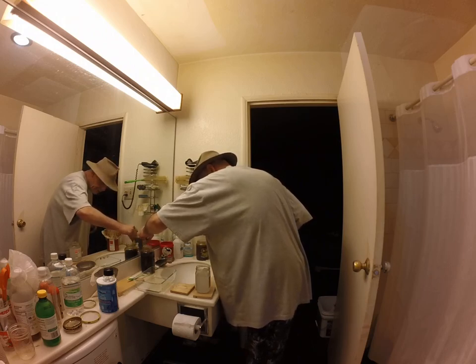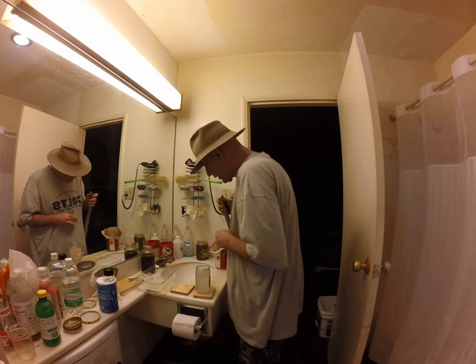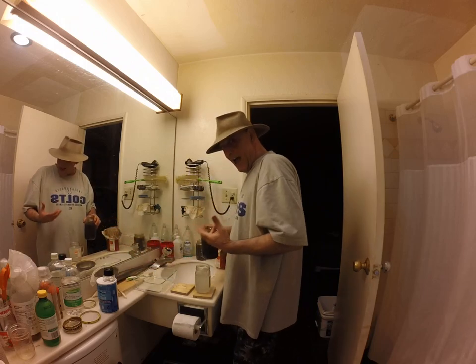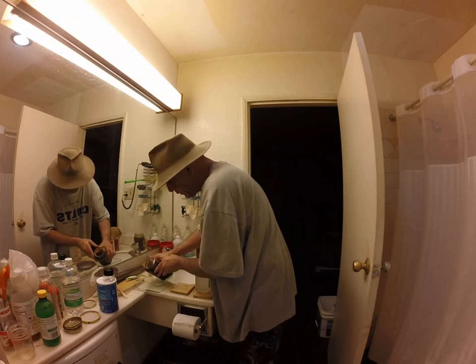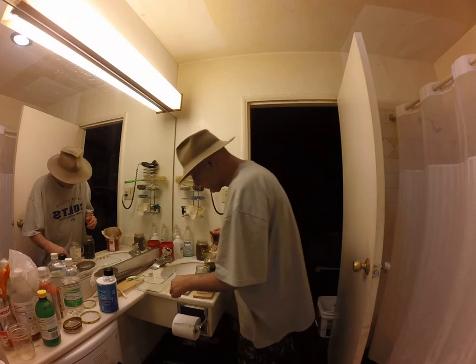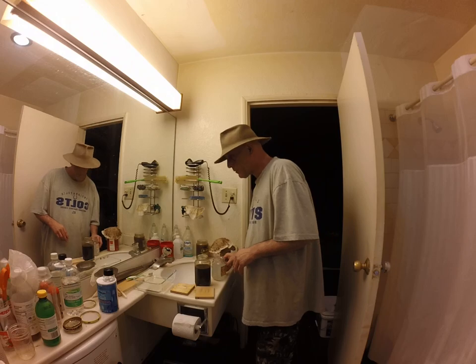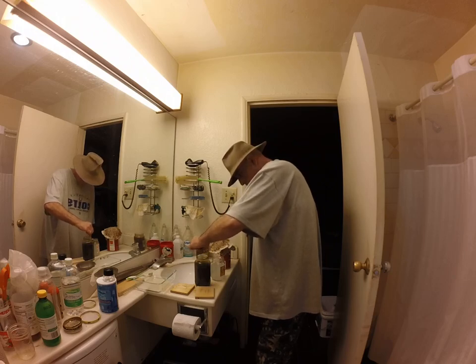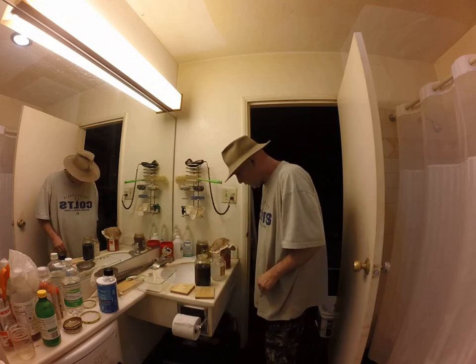There may still be little hunks of this and that in there. Like I said, this is a process and it gets more pure each time. There may still be some fats or whatever from the seeds — the starting material seeds are pretty fatty. I just added some more vinegar because I wasn't sure it was acidic enough, since I don't have a pH tester. So I have to do everything by color, and that works but it's not ideal.